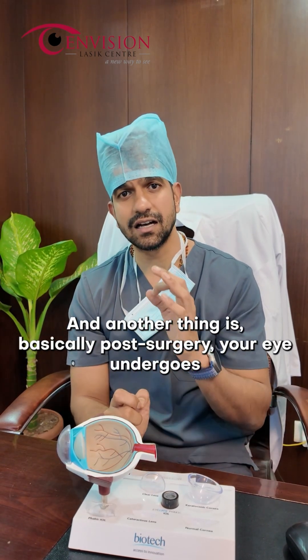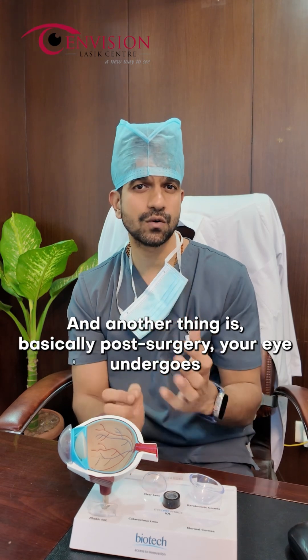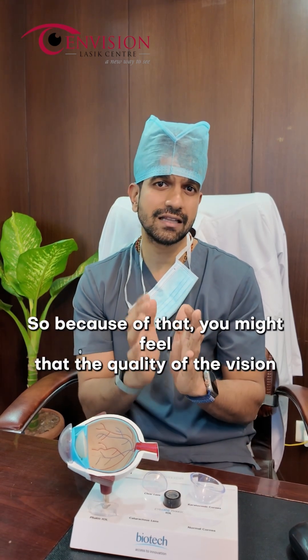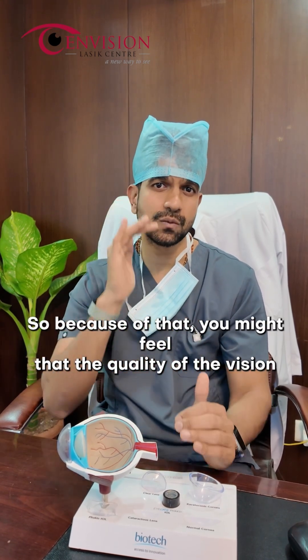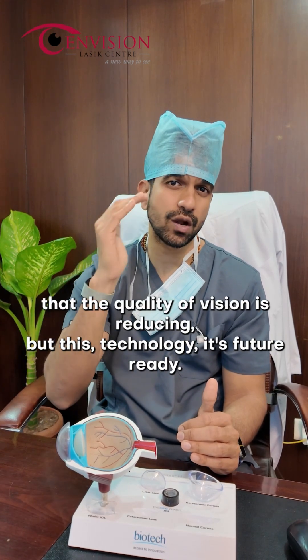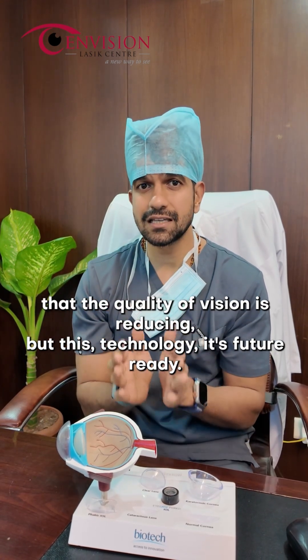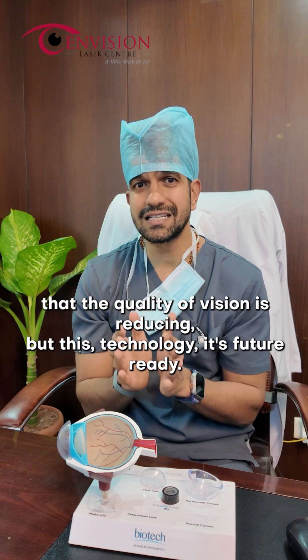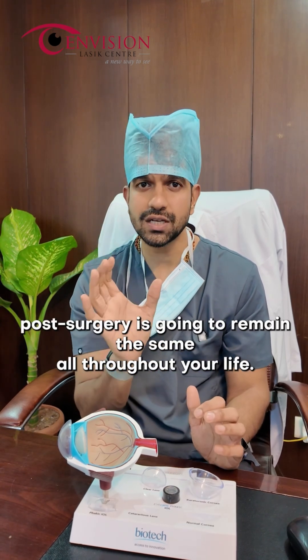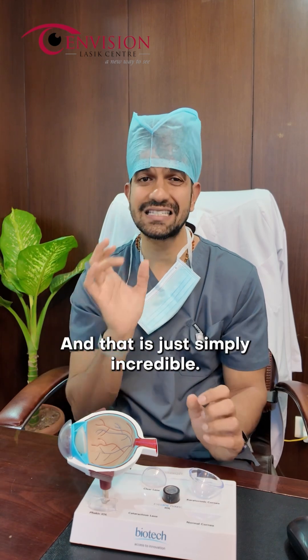Another thing is that post-surgery, your eye undergoes a lot of changes, and many patients complain that the quality of vision reduces over the years. But this technology is future-ready, so the quality of vision you experience post-surgery is going to remain the same all throughout your life.